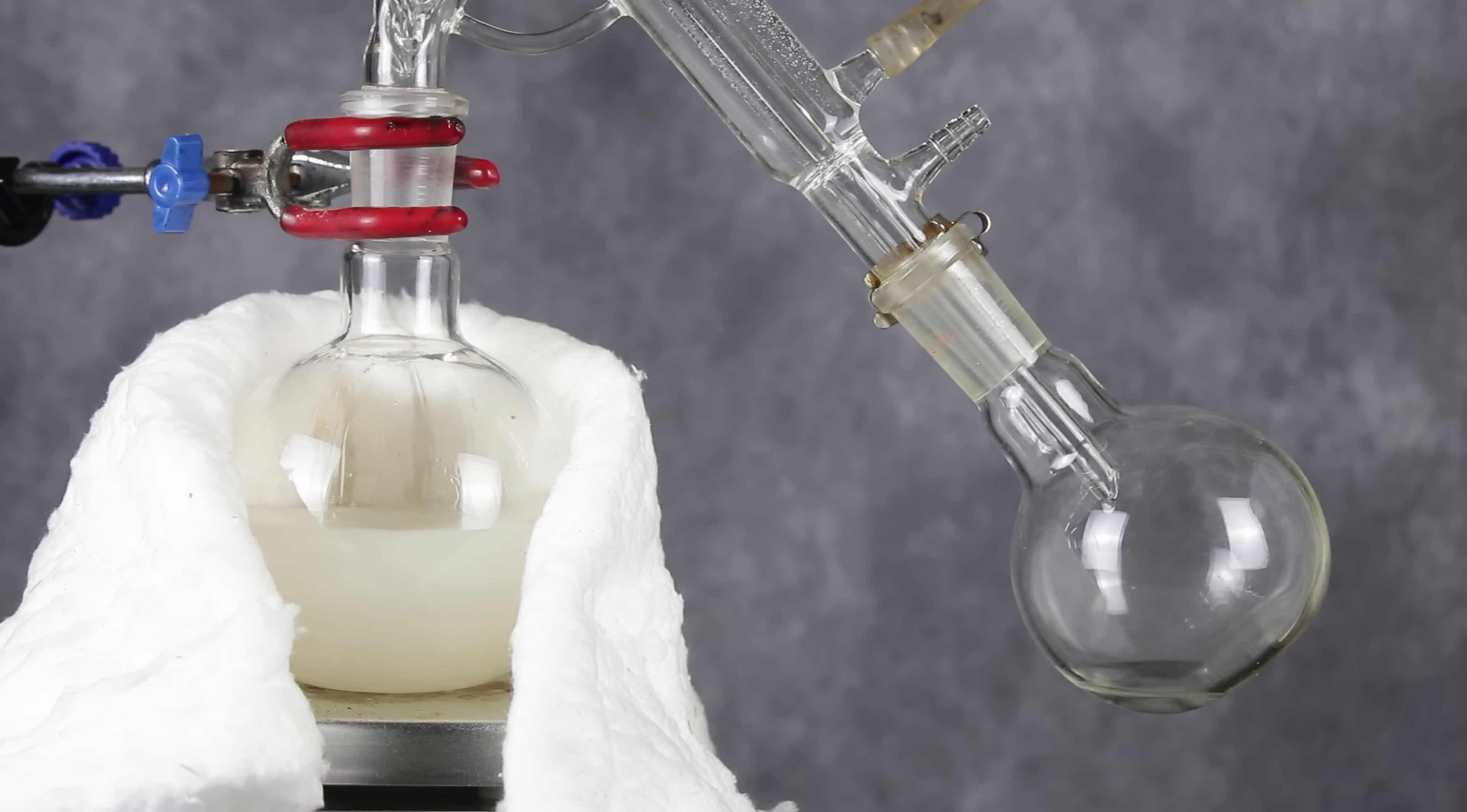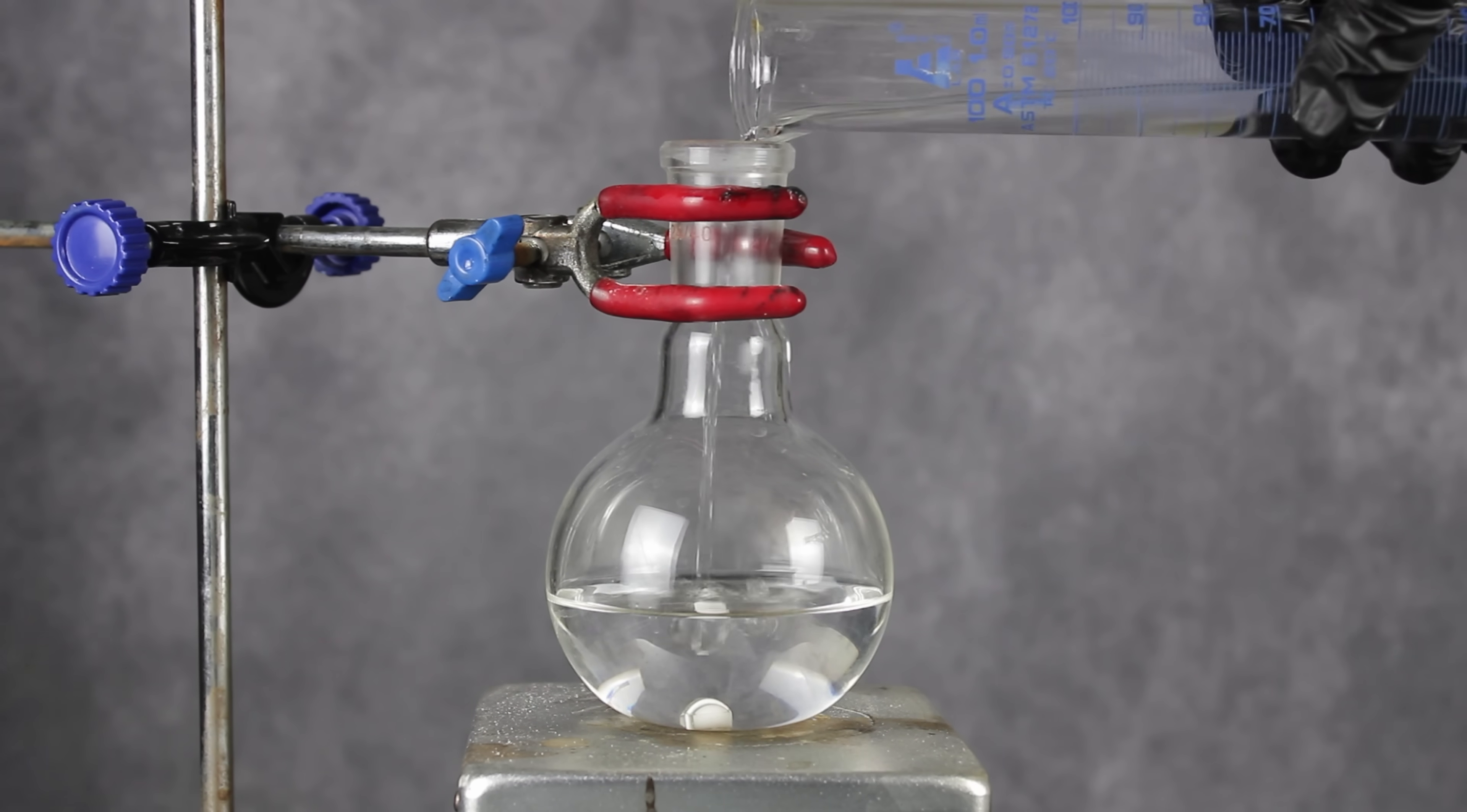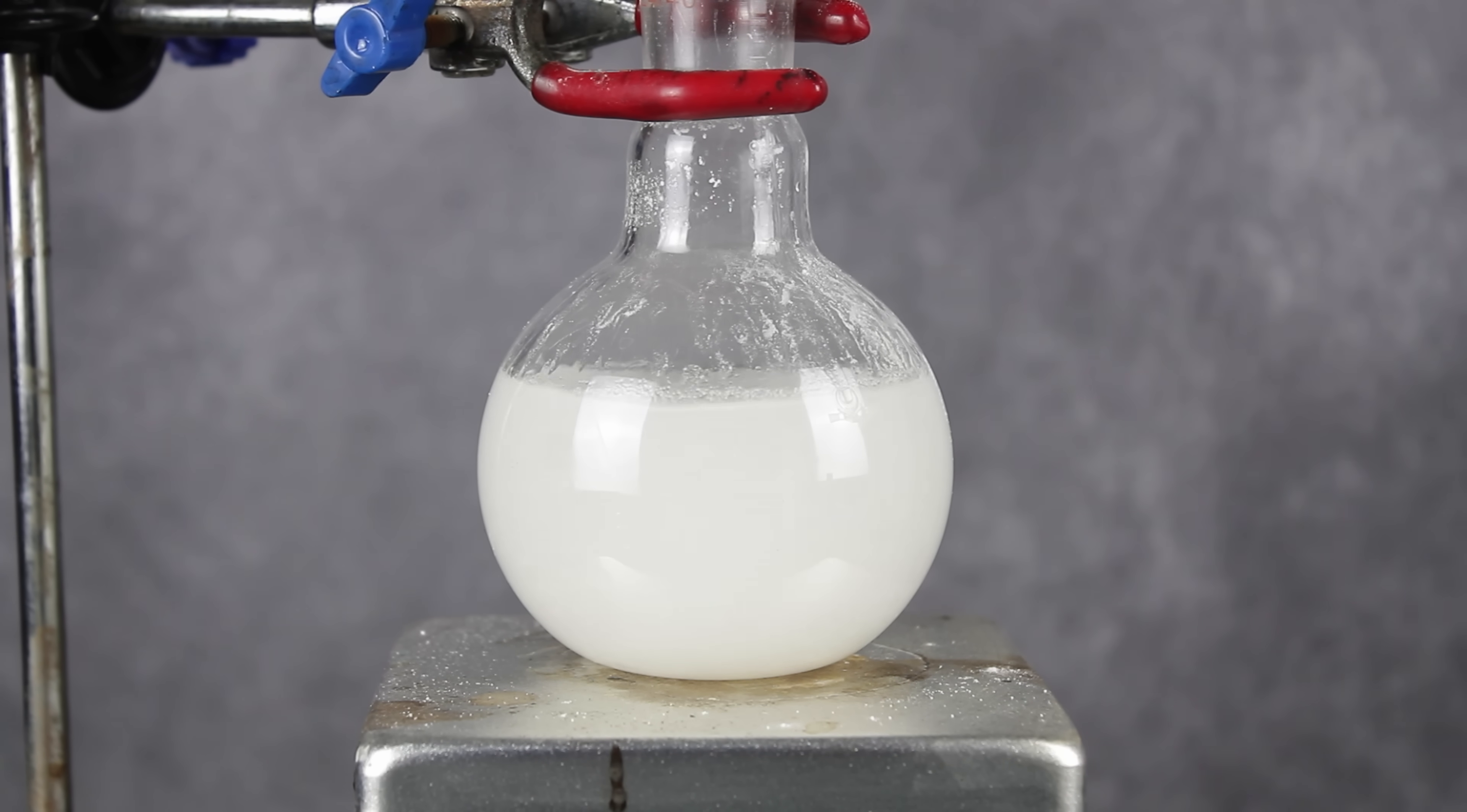Once the reaction died down, the setup was reconfigured for distillation and the dry ethanol was distilled off. For the actual esterification, I went with 140ml of ethanol, 25g of nicotinic acid, and 20ml of sulfuric acid.